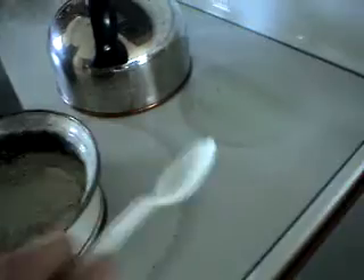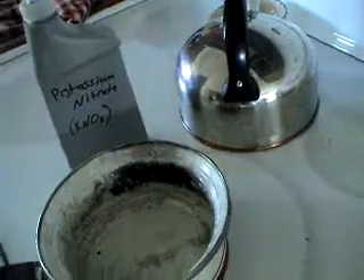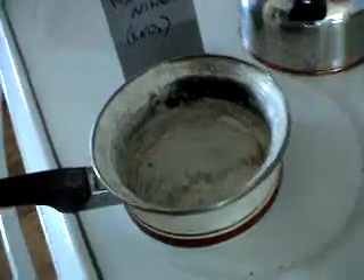Put it in the freezer and freeze it for a couple hours or a day or two, and when you're done it'll be formed in crystals. Then you just take those, grind them up, and you have pure potassium nitrate.